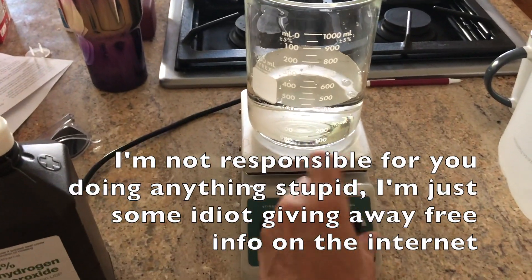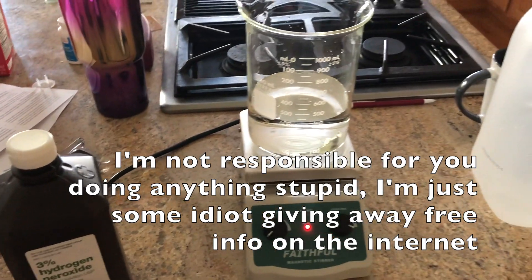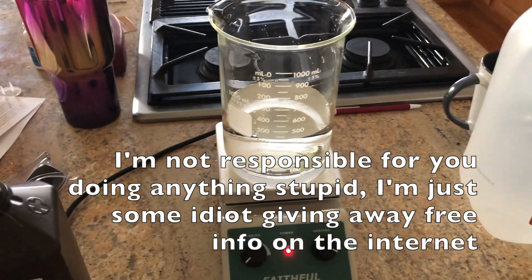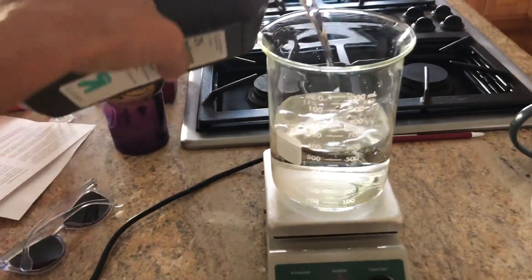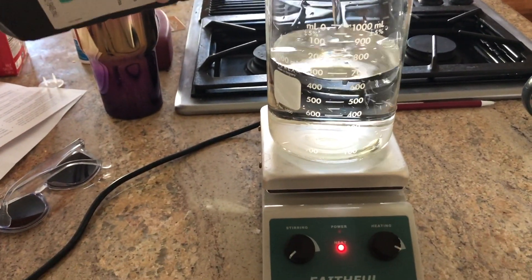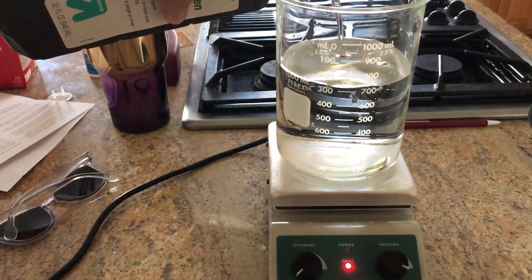Turn the heat all the way up and we're just gonna bake it down to about 10%. So from one liter to 100 milliliters.